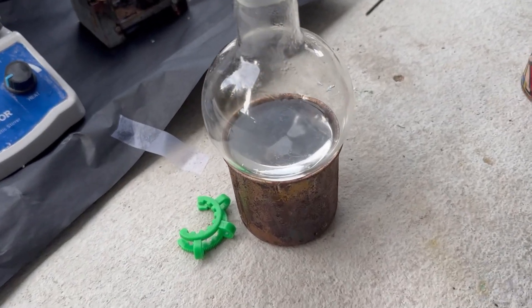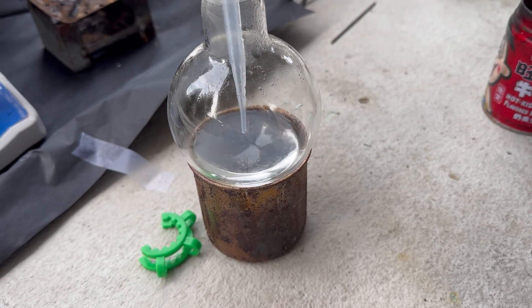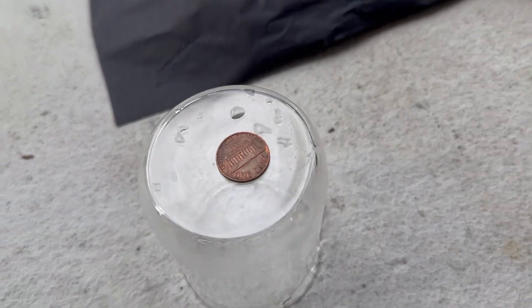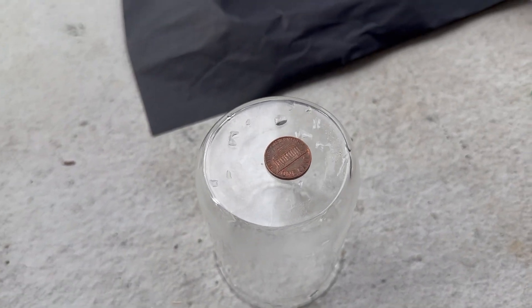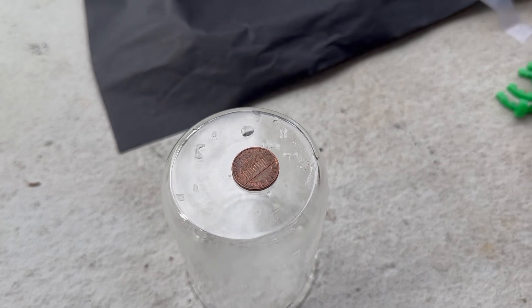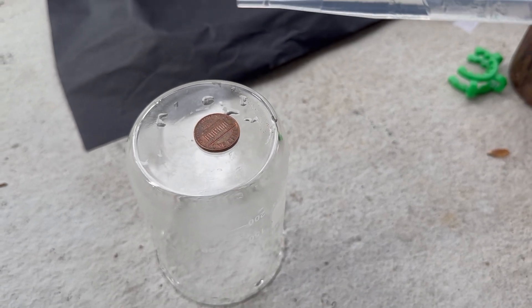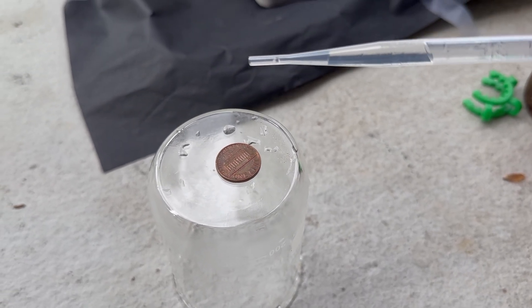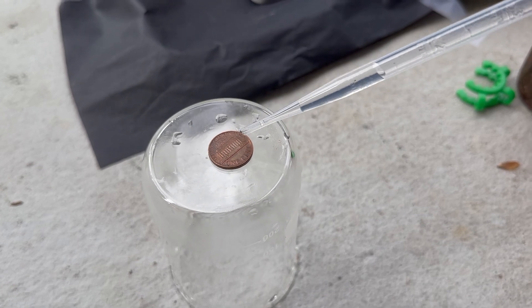All right, this is the moment of truth. So here I'm gonna pipette some up, and we have a 1980s penny, which means that this one will be mostly copper. So if this starts dissolving and gives off nitrogen dioxide fumes, we know we've got the right thing.